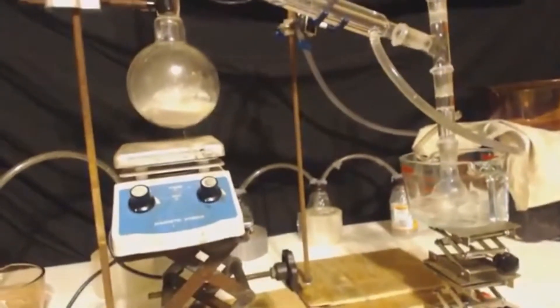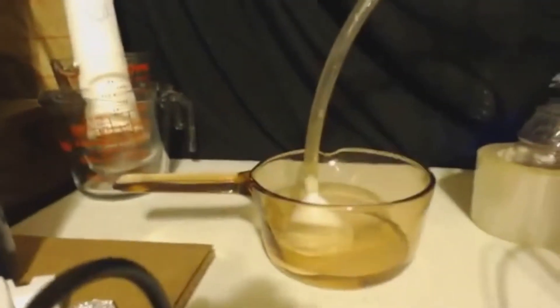I've got my bubbler back there. When I start distilling, I have my ice bath — it comes down to the bubbler in the back. I have two bottles filled up with sodium hydroxide, and this last part with the funnel is filled with water to scrub anything out.